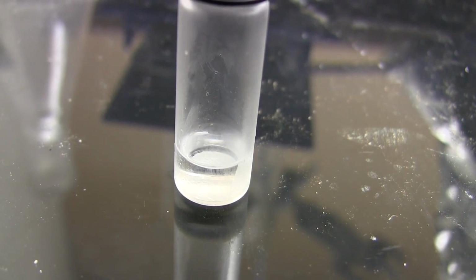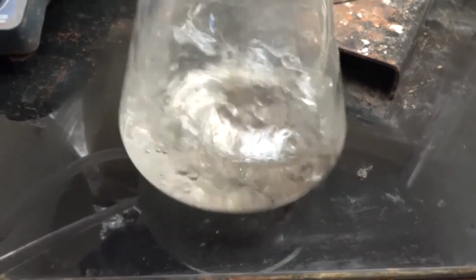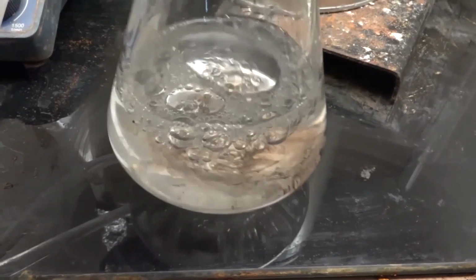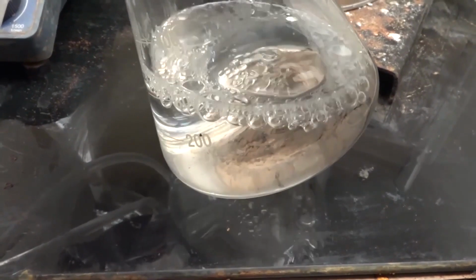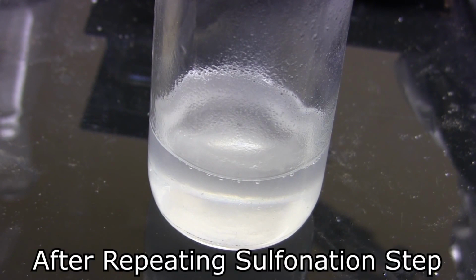Anyway, in our first run back here, the sample should have remained liquid even in the freezer. So we still have a lot of orthochlorotoluene that we need to separate. We'll need to do our sulfonation again. Make a note of how much chlorotoluene you have now and calculate how much sulfuric acid you'll need to equal 1/3 molar equivalent. Anyway, here is the purified para-chlorotoluene.